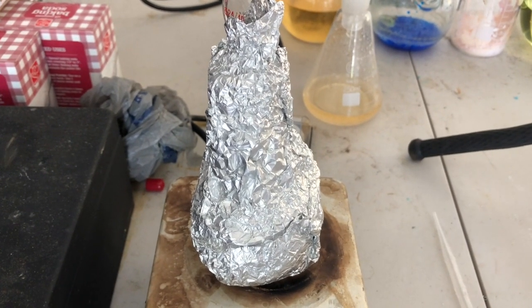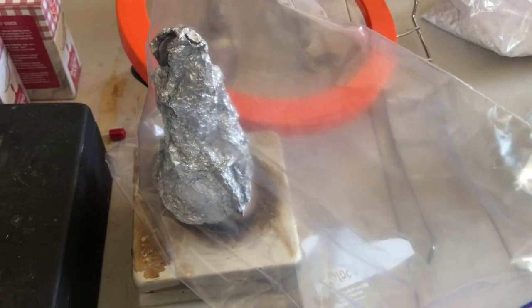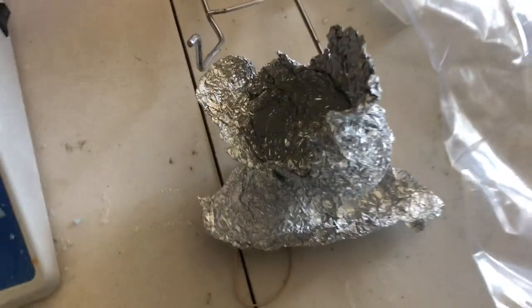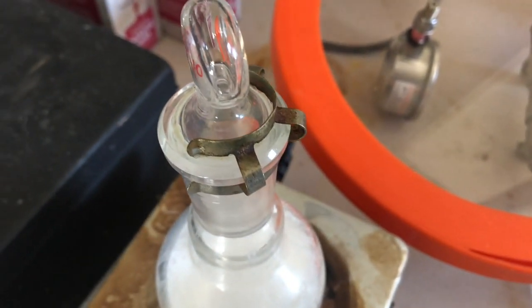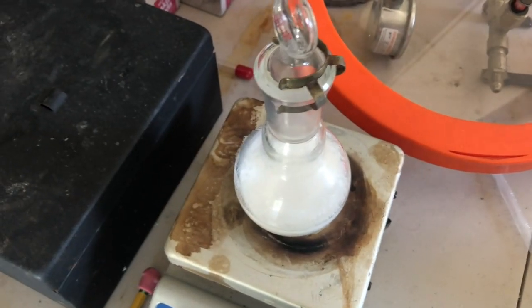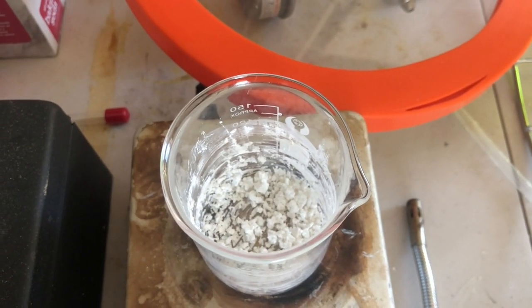Yes, you heard me right — this reaction is three days long. I also put the ethereal HCl solution inside a plastic bag because I didn't want the vapors to go everywhere. The aluminum foil was pretty eaten — hydrochloric acid definitely got to it, and the metal Keck clamp too. Now that everything's situated, I dry my product and we are ready for the last step.